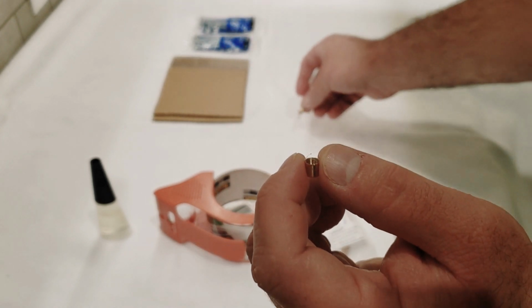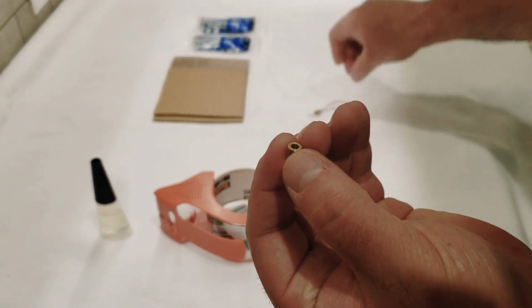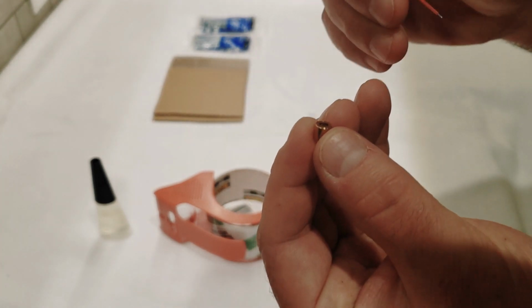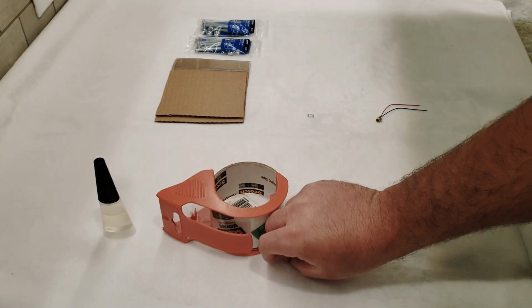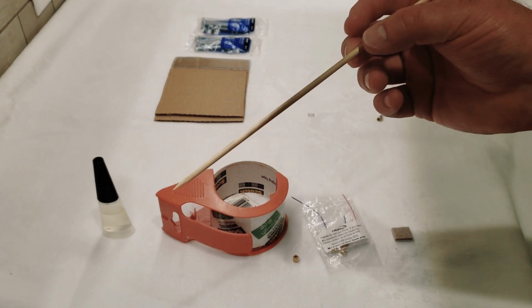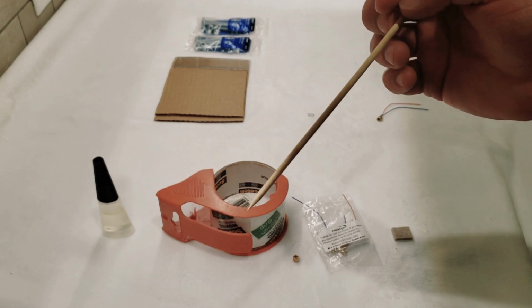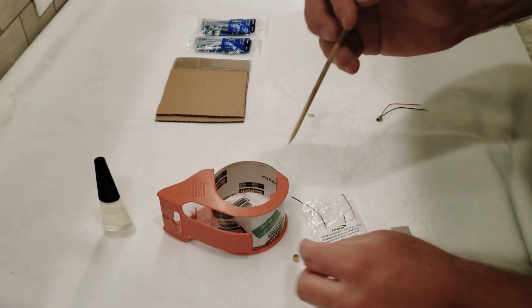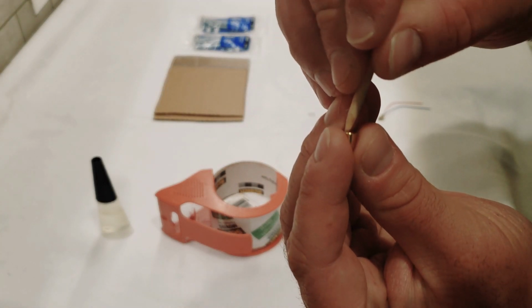So we're going to set that aside. That's not any use to us right now. Maybe we'll use this wire to kind of poke the lens out there. Actually, that's not a great idea because it will scratch that. I'm going to set this down and see if I can find something to poke that out with real quick. So I think I settled on just using this wooden skewer. You don't want to use anything particularly hard like that wire I just tried, because the lenses are cheap plastic and it will scratch them really easy. Even with this wood, you're going to want to be careful.